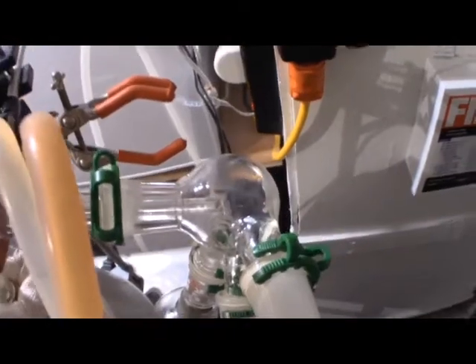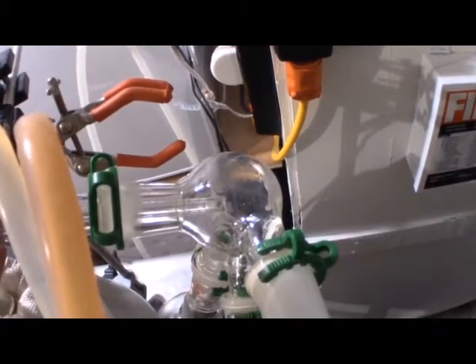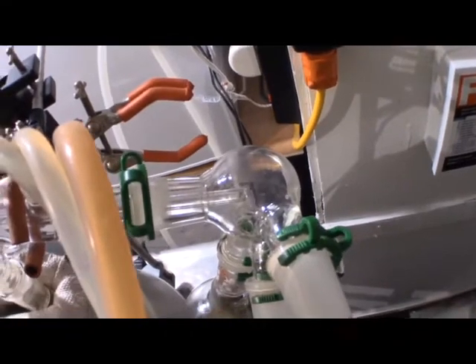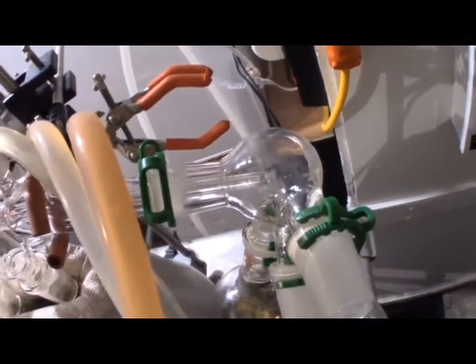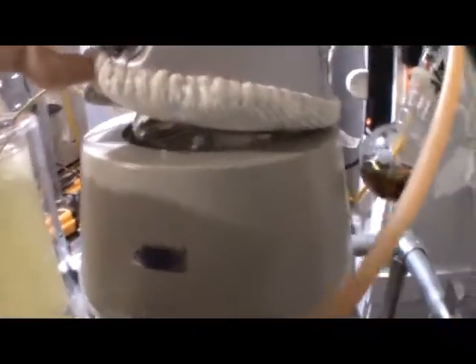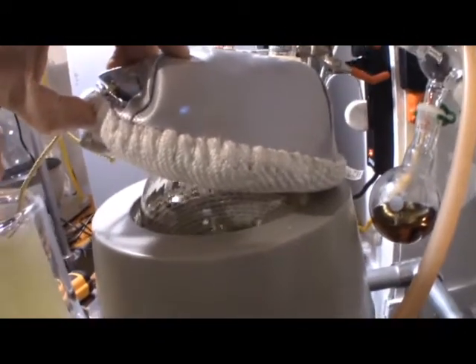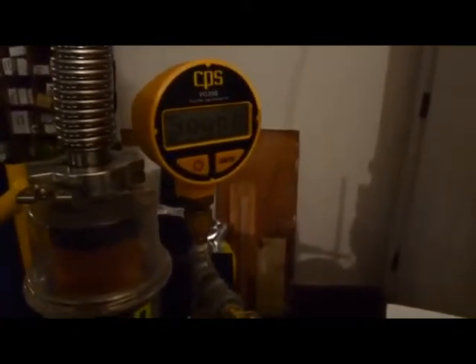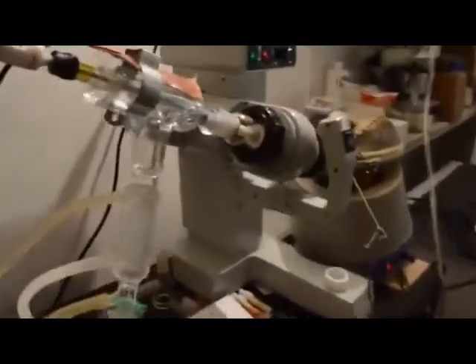We have three thermometers gauging this unit. Once they all hit even, you'll get this quick response because you've reached the evaporation of the elements you're seeking per temperature micron vacuum pump, which has to go down quite far in pressure for these to work.